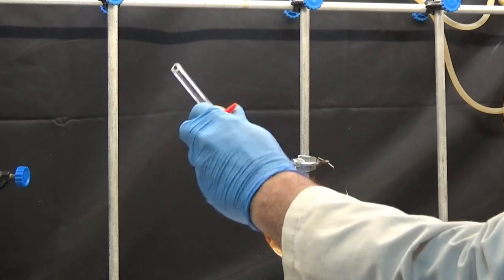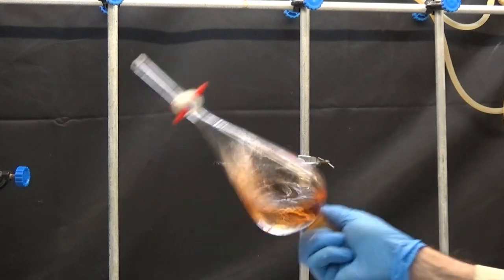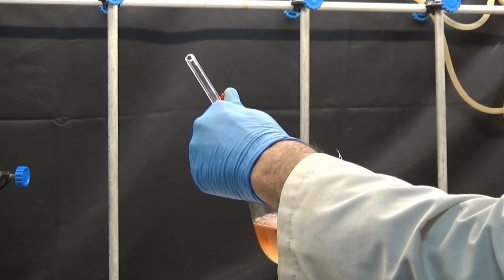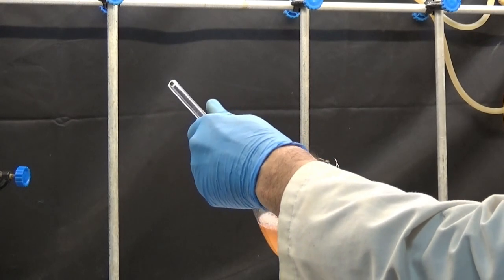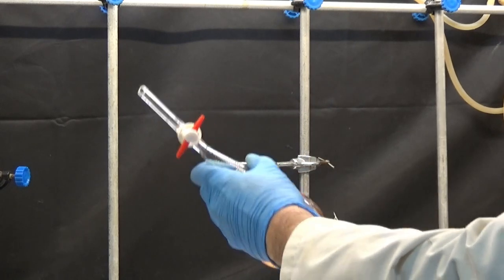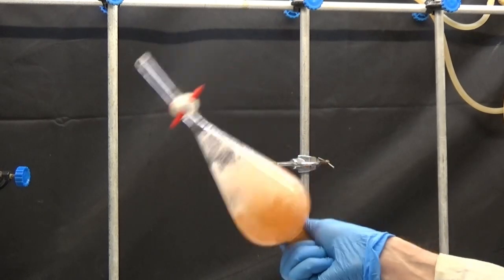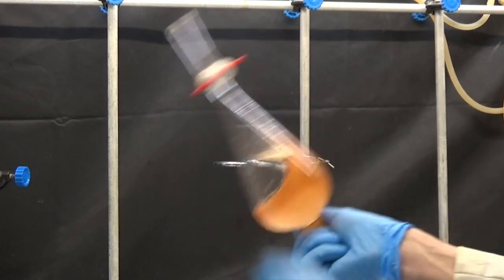Shake vigorously to neutralize the acid and obtain the hydrosoluble sodium phenylacetate solution. In the extraction process carbon dioxide is produced, open the separator funnel valve frequently.